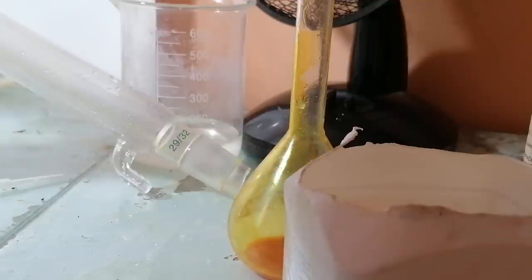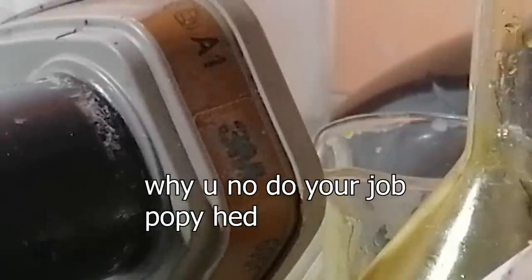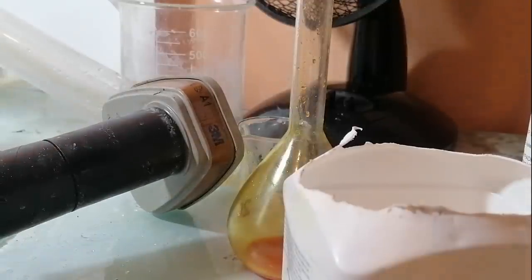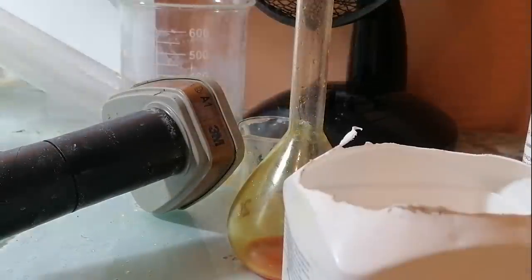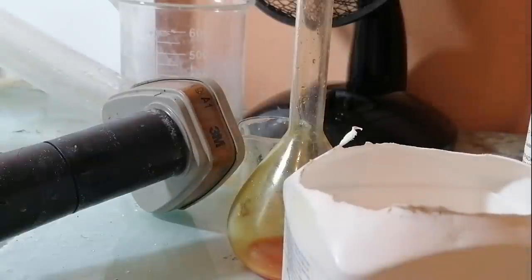The sulfur chlorides were kept in a volumetric flask until I needed them. After the procedure, the whole house straight up reeked — I'm really underplaying this. The whole house literally smelled like rotting garbage with that classic sulfur rotten egg tinge for like 10 hours. Anyway, this is the last step, which is the acetic anhydride synthesis.